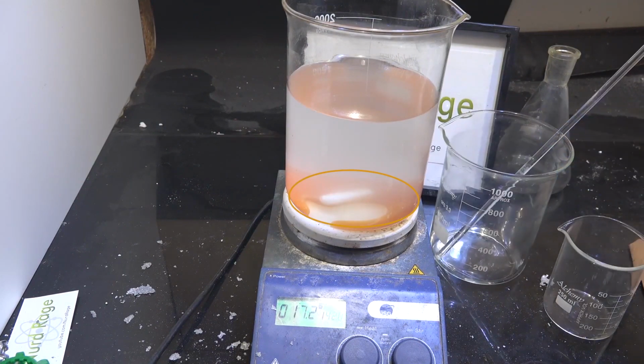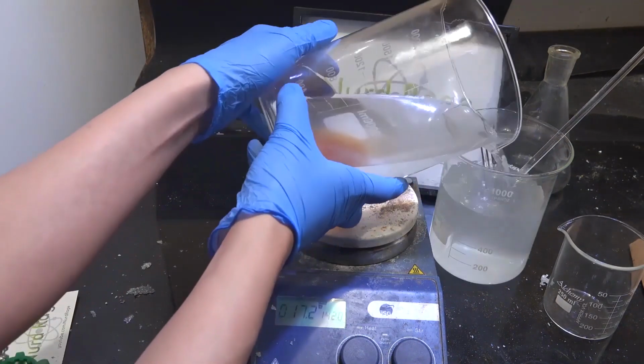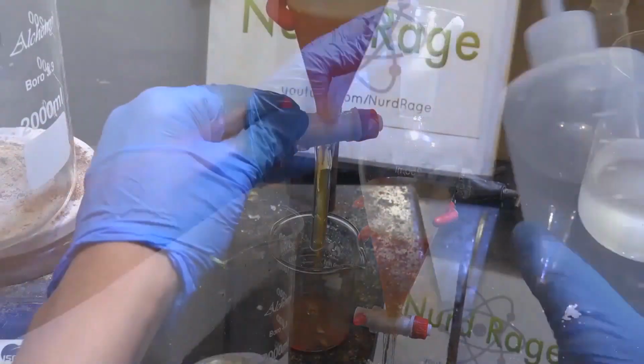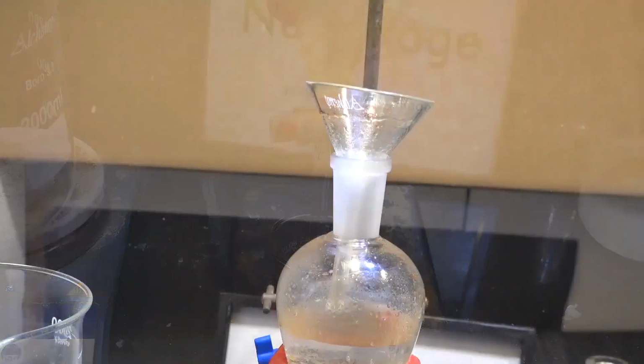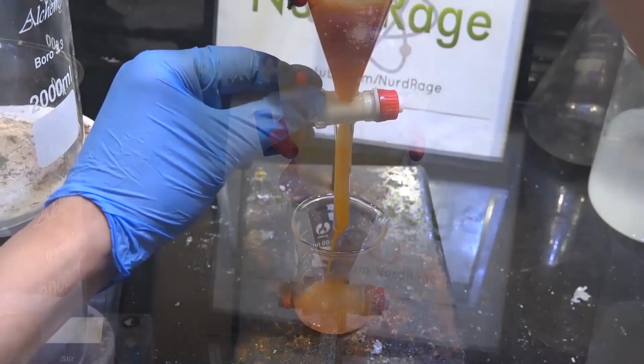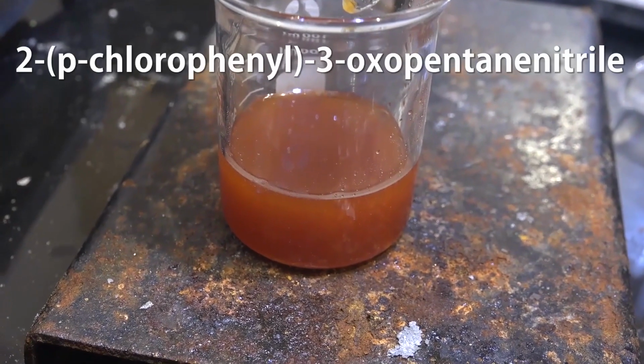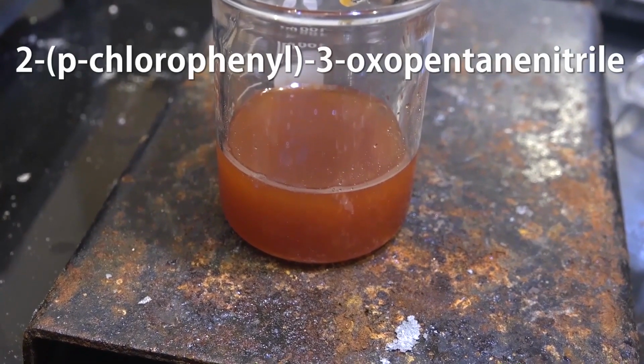The organic layer on the bottom should have our product. Now pour off most of the water and use a separatory funnel to get the rest. I recommend washing the organic layer again with 100 milliliters or so of water for further purification. And here is our crude 2-para-chlorophenyl 3-oxopentane nitrile.